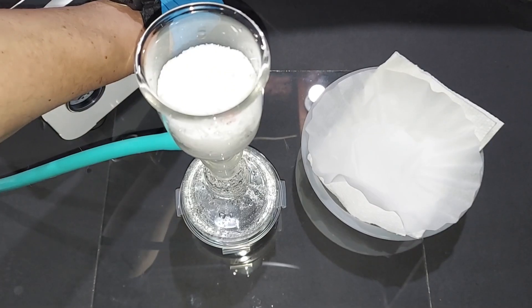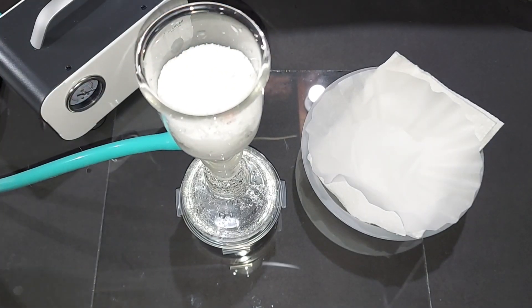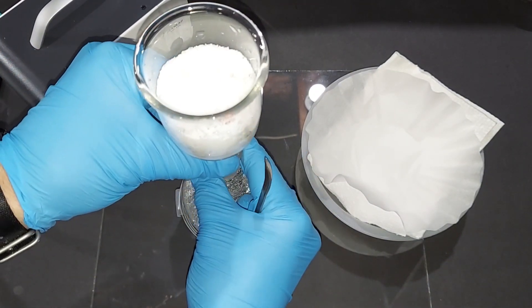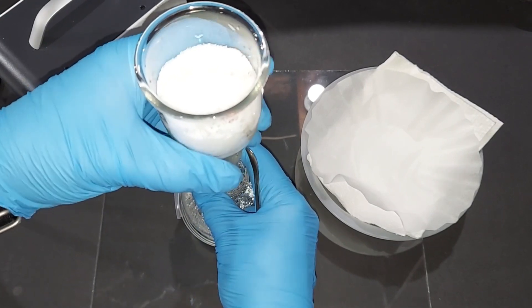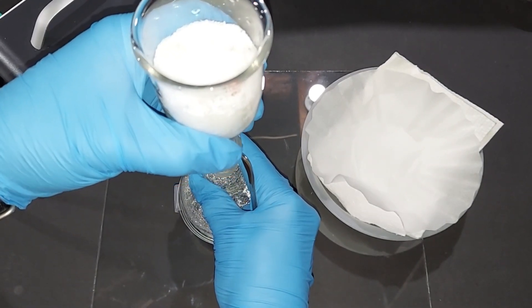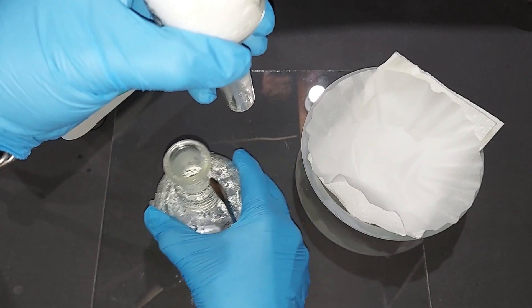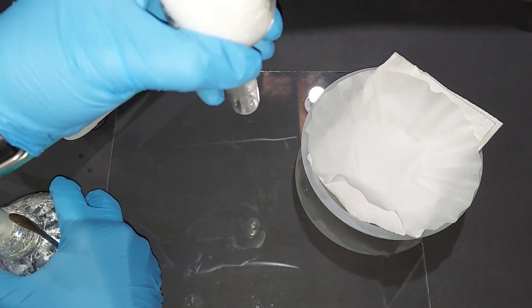I'm done dripping through all of the cold distilled water, and I've got to say it's always nice when the chemistry works, meaning that I poured a lot of water on this to clean it, and none of it disappeared. Again, because potassium persulfate is so insoluble in cold water. Let's move this over here.